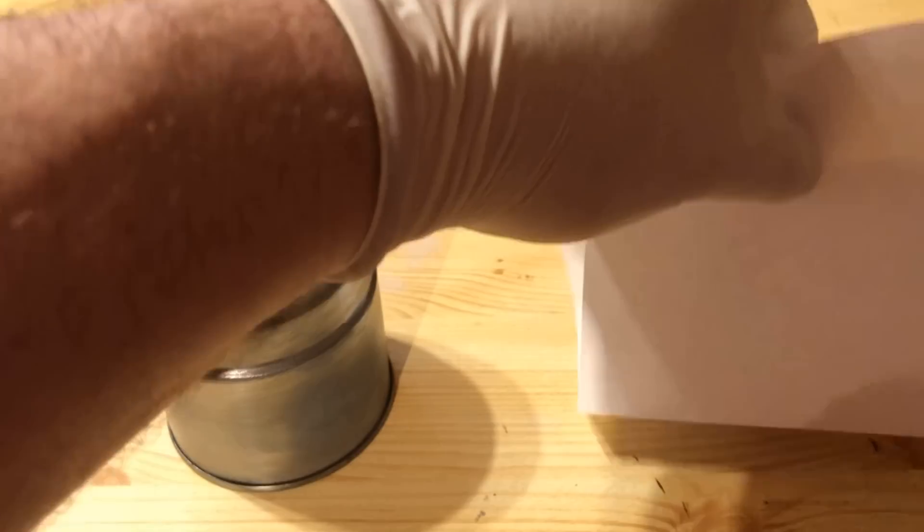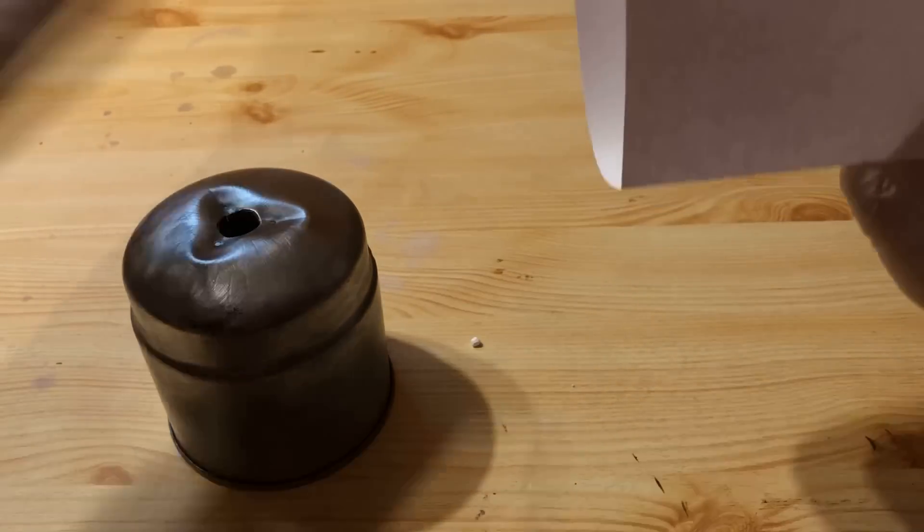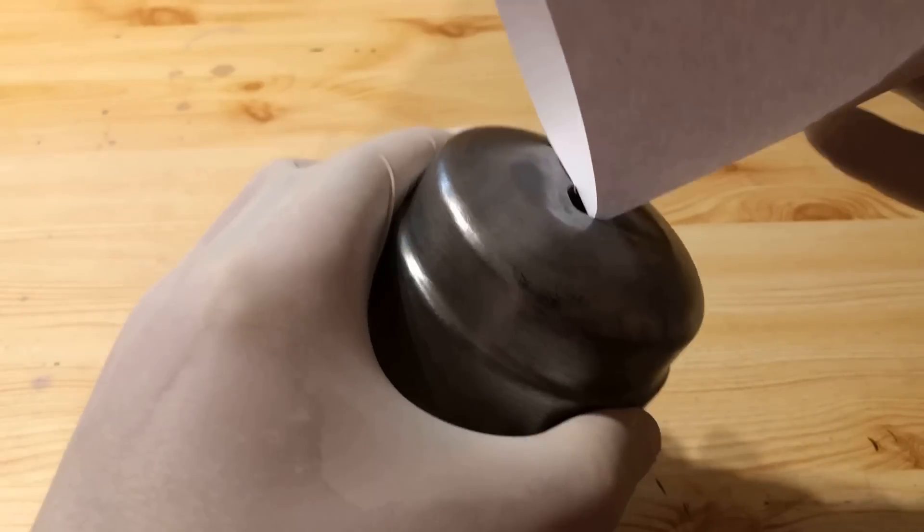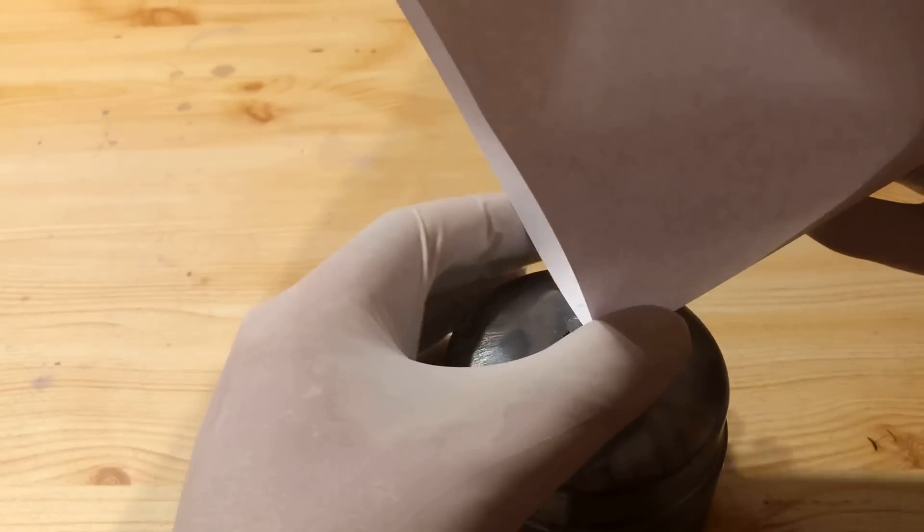The mixture is poured into a suitable tin can. I use an empty gas cartridge for my lab burner, where I have removed the paint.